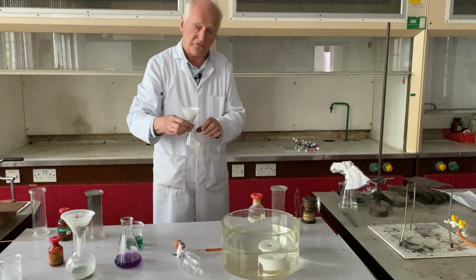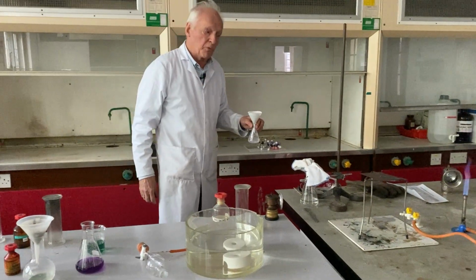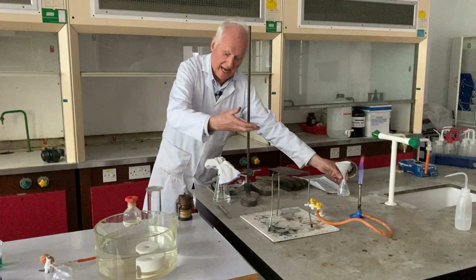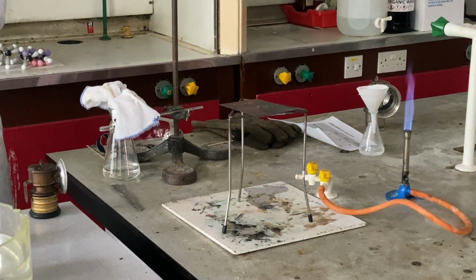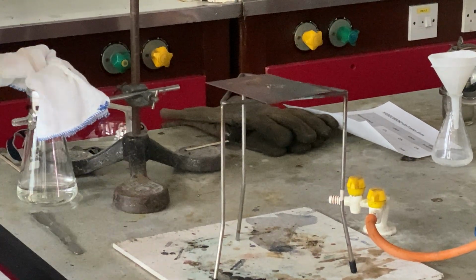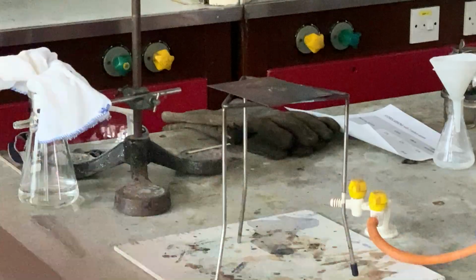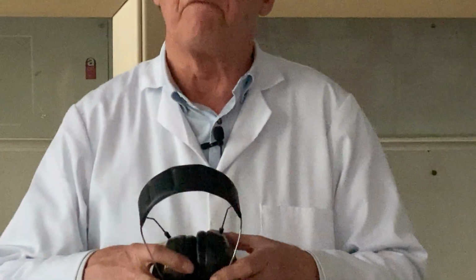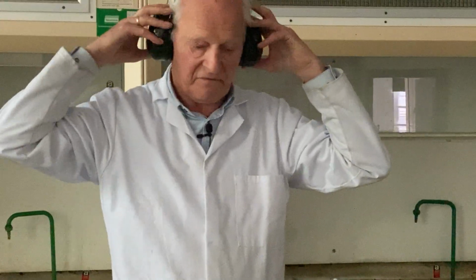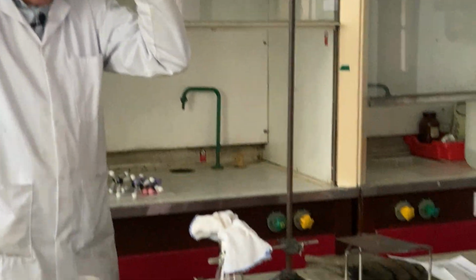So I'm going to illustrate for you the extraordinary instability of this by heating a small quantity which has been placed on a metal tray here. And what we're going to do now is to place a Bunsen burner under it, which will, in a very short space of time, cause it to detonate. Now, when it detonates, it really does make a very loud bang indeed, and we hope you'll see the flash. And obviously, because this is such a very loud bang, I'm going to put on ear defenders. So here are my defenders. Obviously, safety goggles as well. And I'm going to put these on.